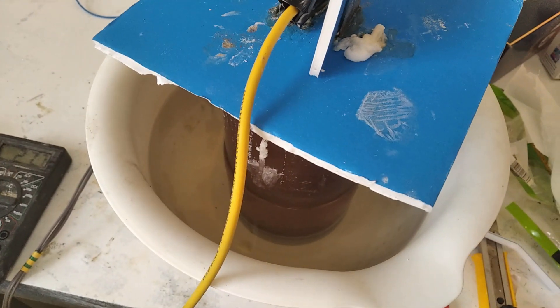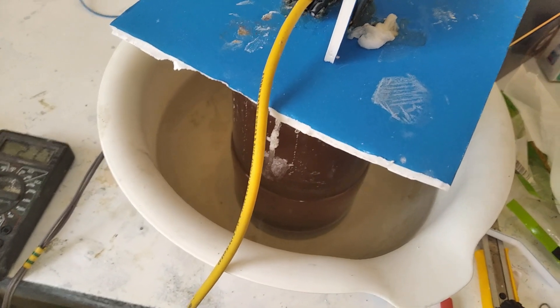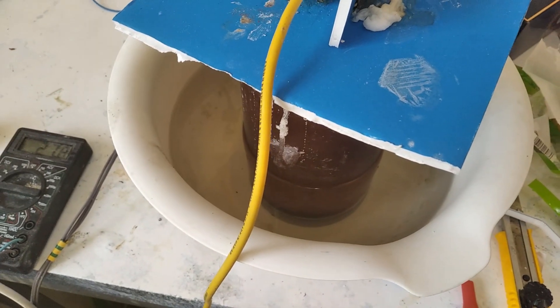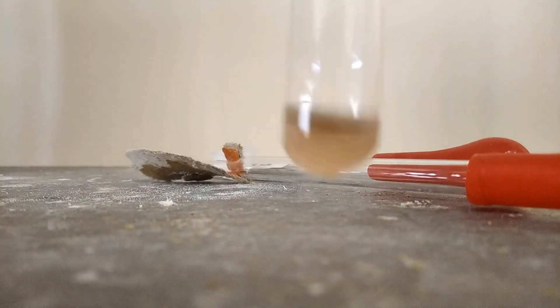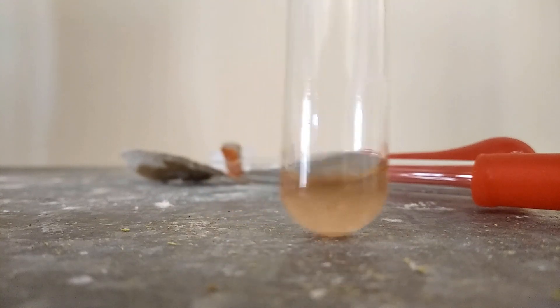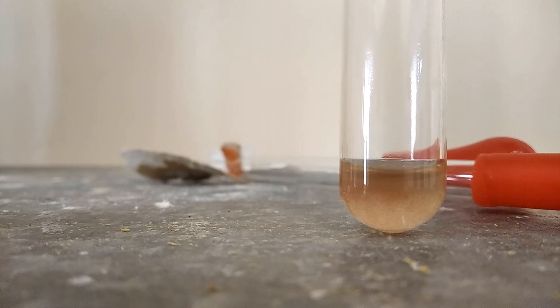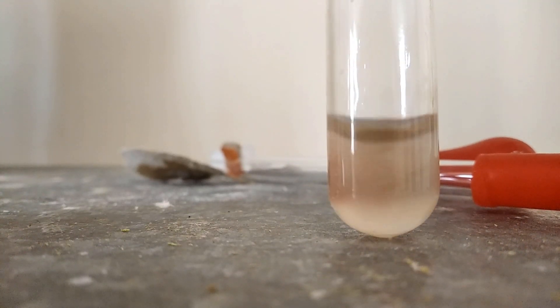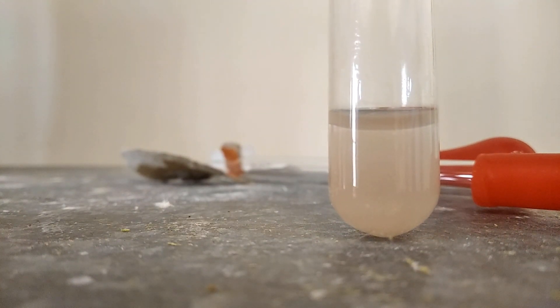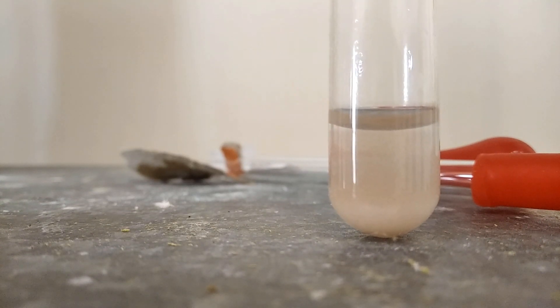The pH control is better than before, and the pH is very high here. I've tested the liquid and it causes instant precipitation, and there's also a smell of ozone in the air, so we're definitely there already. This is a bit of the sample solution from the cell. I'm going to show you that this contains some perchlorate by doing the instant precipitation test. You can see that precipitation was very quick. Now, if this was chlorate, it would take a hot minute. But yeah, that shows we indeed have perchlorate.